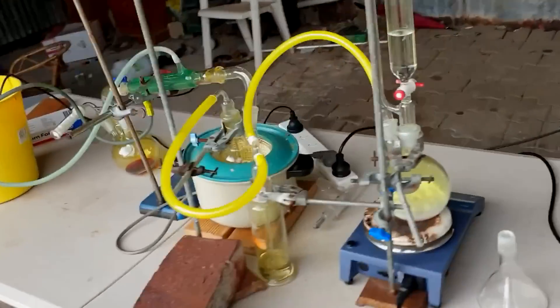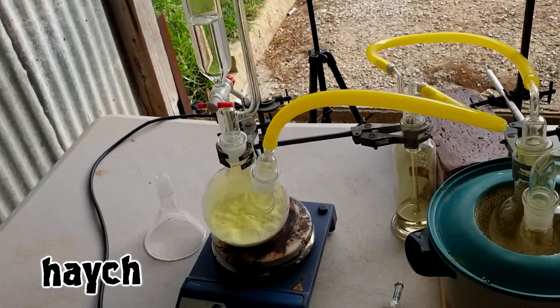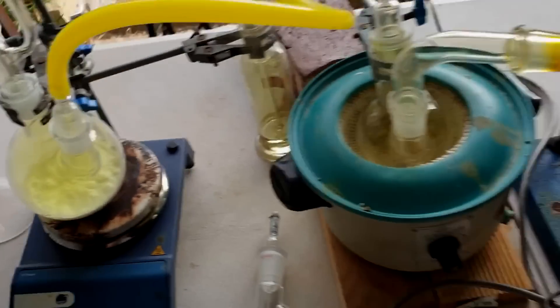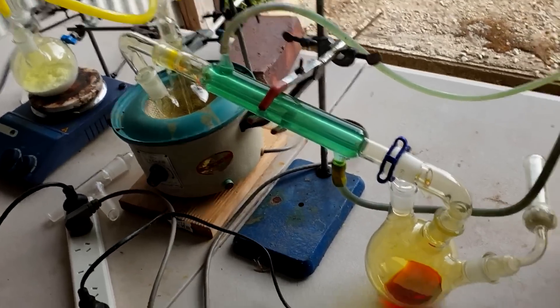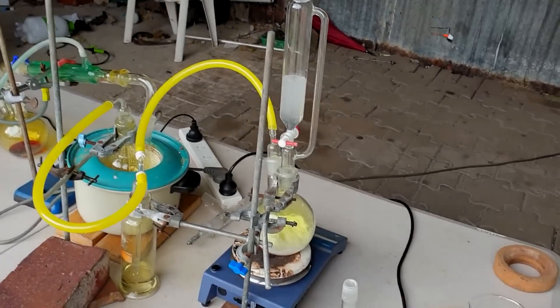Distillation has stopped, and for good reason — we're out of sulfur. Stopped the HCl addition. There's still quite a bit of chlorine being generated. That's looking good. I'll let it cool down a little and then I'll start taking it apart. To stop this, I've replaced the acid with some sodium carbonate solution.